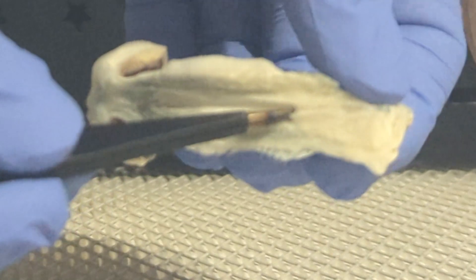You want the sample to be at least about the size of a piece of rice or bigger, but it doesn't necessarily have to be bigger. You just want to avoid taking samples that are too small or smaller than a piece of rice because they could dry out before they have a chance to go back vegetative and start growing on the agar.